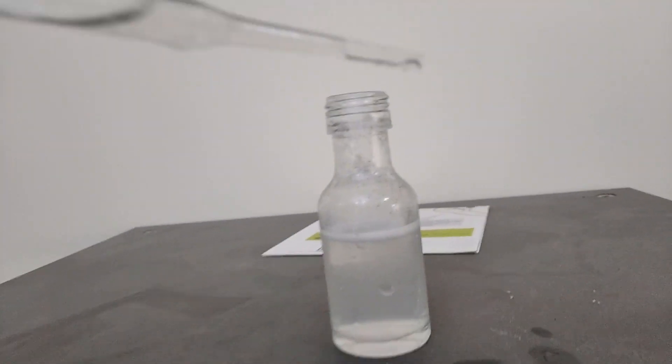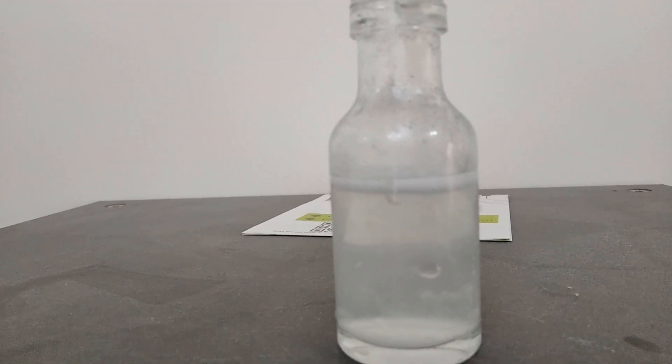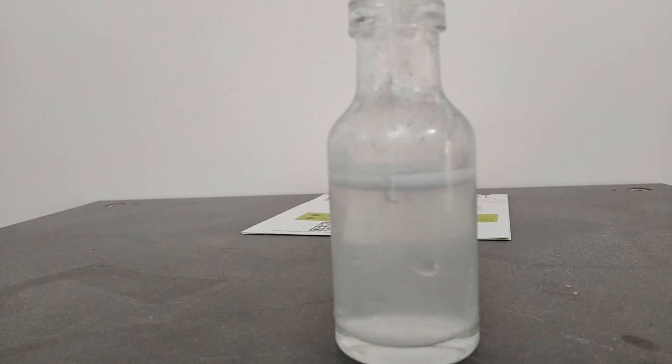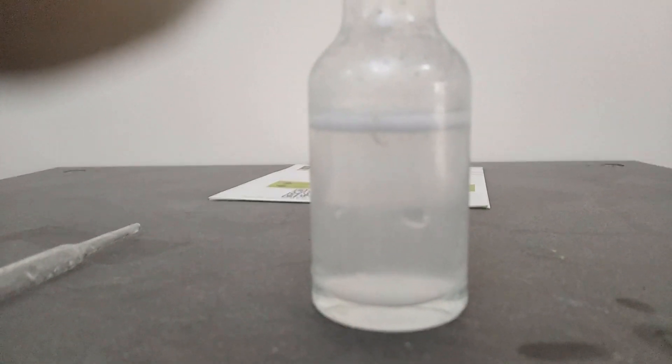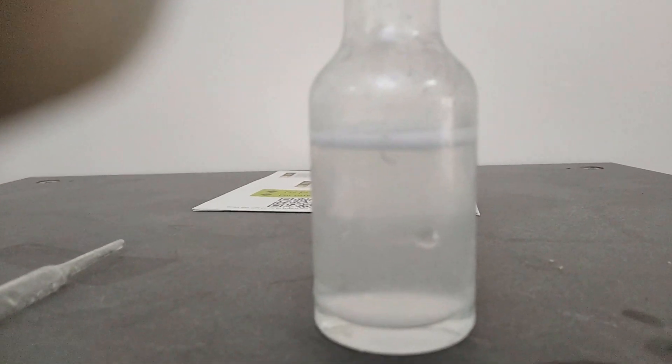Here's some product from the 32 amp cell. Let's drop it into this potassium chloride solution — you can see it's immediately forming white precipitates upon addition, which fall to the bottom. You can see quite a thick layer of precipitate at the bottom. It's producing perchlorates, and it's only been a few hours. According to the online calculator it should take one day to fully convert, but I don't think it'll be that efficient, so I'm going to give it two days.